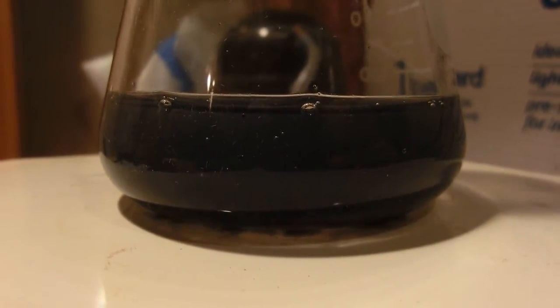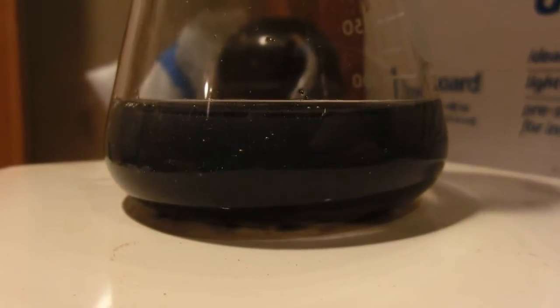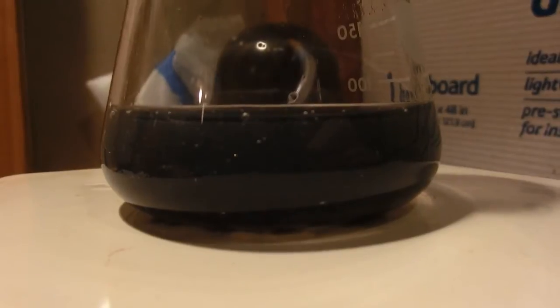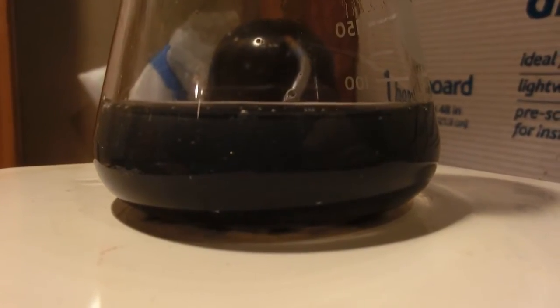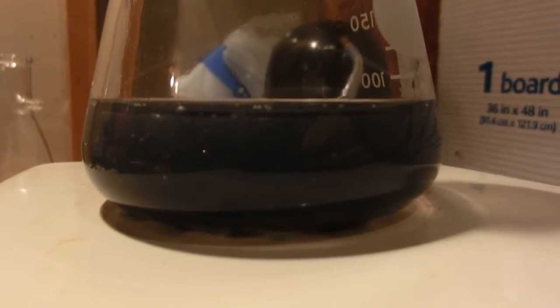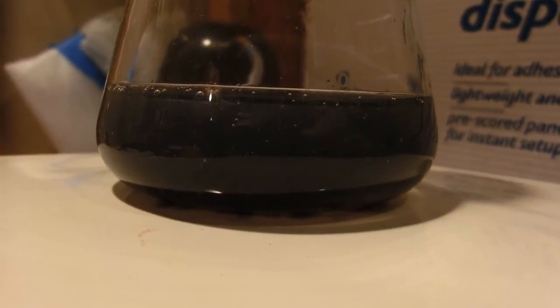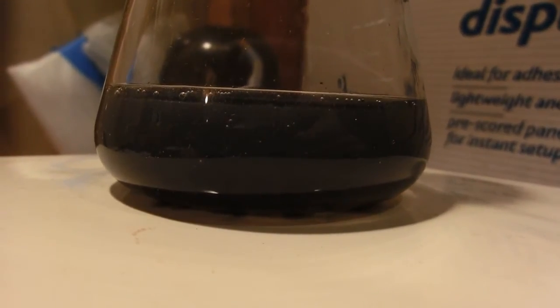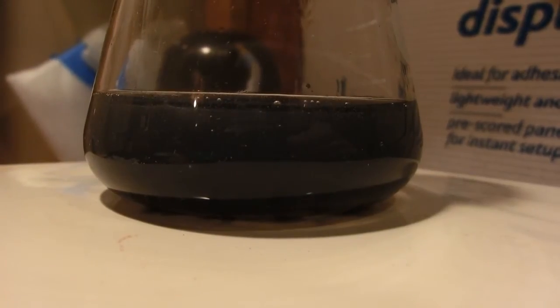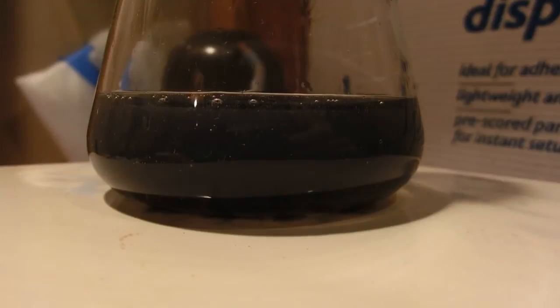Okay, it's been a couple of minutes since I've put this on the hot plate and the solution's become pretty effervescent and it's pretty close to boiling, it's got a gentle boil. But most of that is coming from the reaction between the acetic acid and the lead. And you can see the solution is quite dark and it's become cloudy with, I'm not sure exactly what, maybe it's lead oxides and maybe some impurities. But I'm going to let this react until most of the lead is gone.